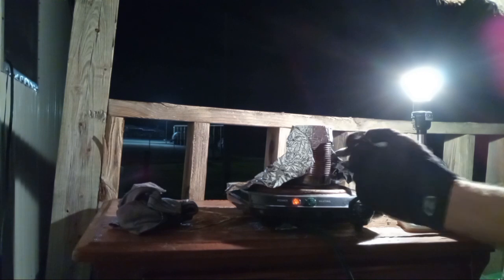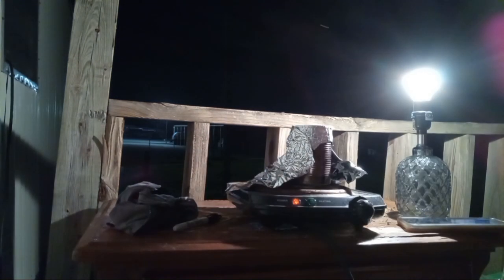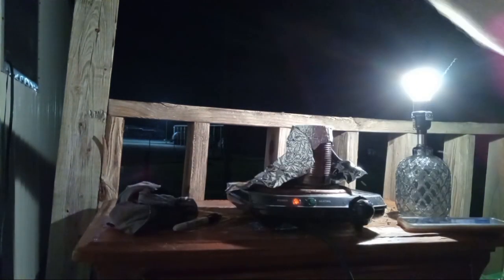Oops, let's not knock everything over. I've used a Sharpie to make some black marks on the lid of the can and about halfway down the side and down here, because anything reflective is bad for getting proper temperatures with an IR thermometer or temperature gun, whatever you want to call it.